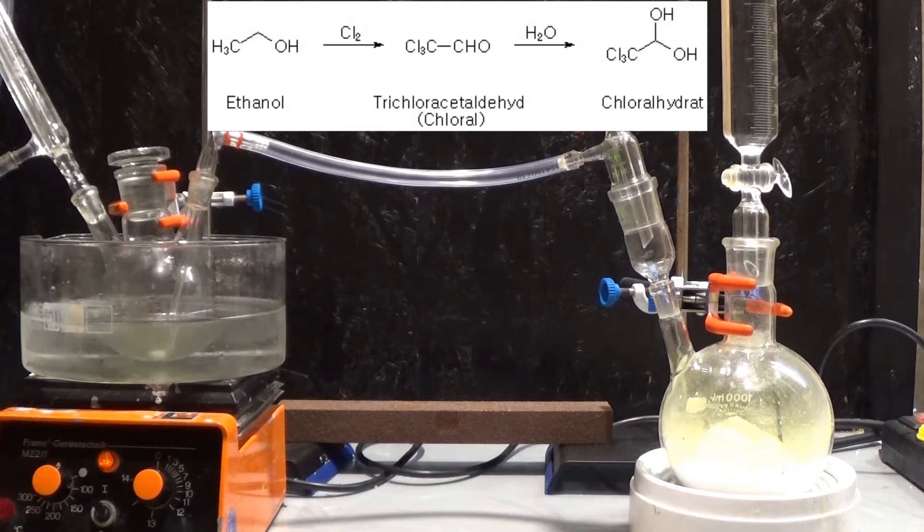This then runs through the tube into the ethanol where it attacks the methyl groups hydrogens and replaces them one by one with a chlorine atom, yielding at first the mono, then the di, and then the trichlorinated ethanol.